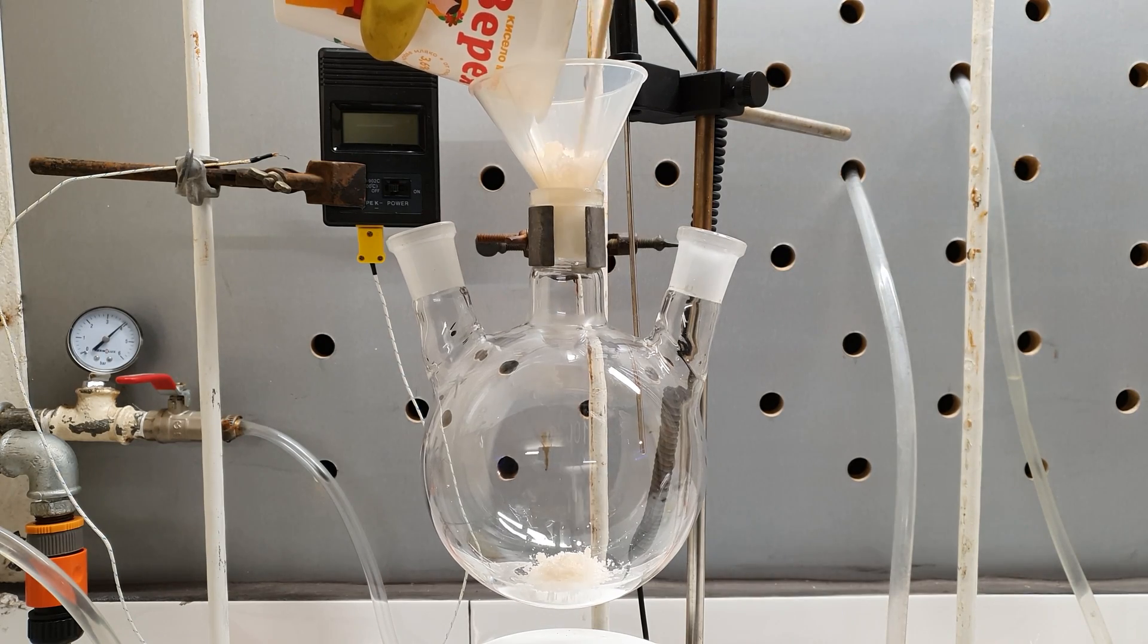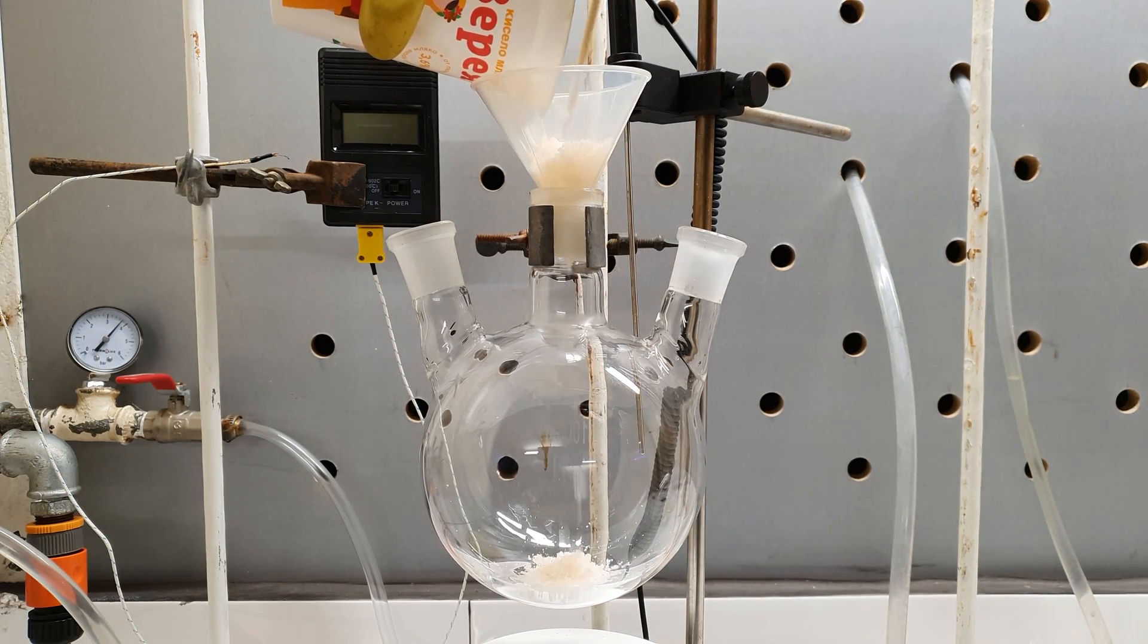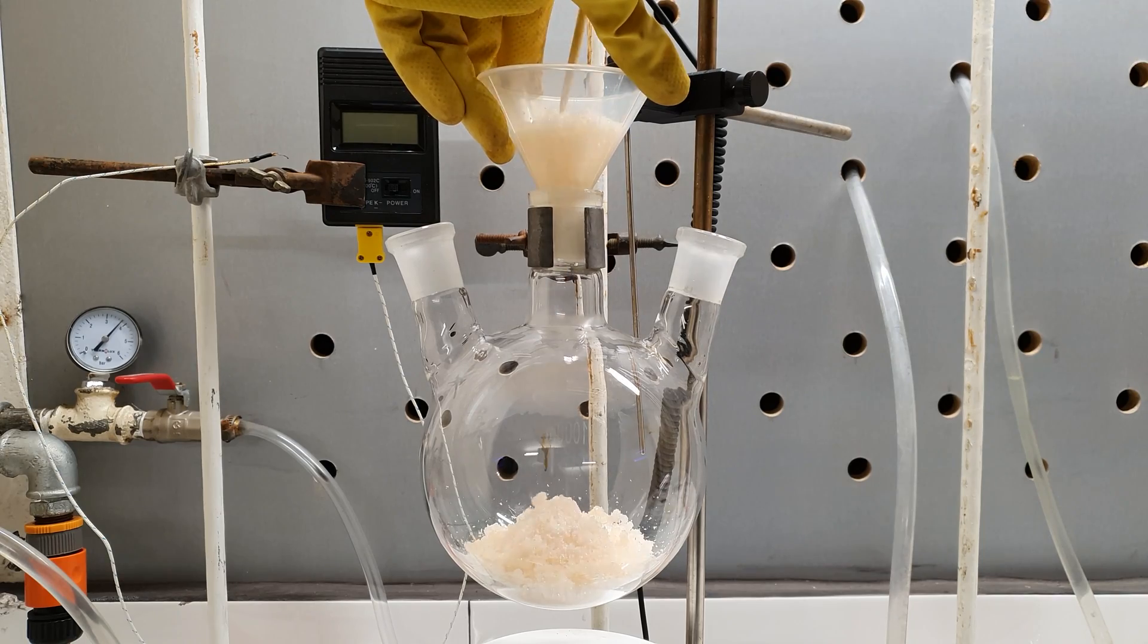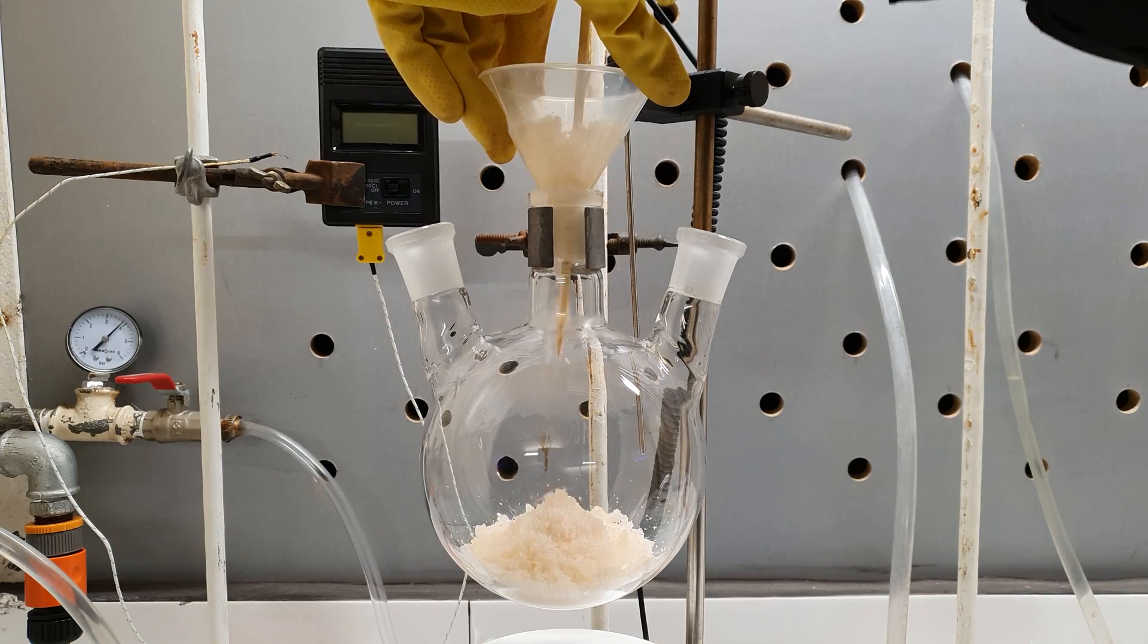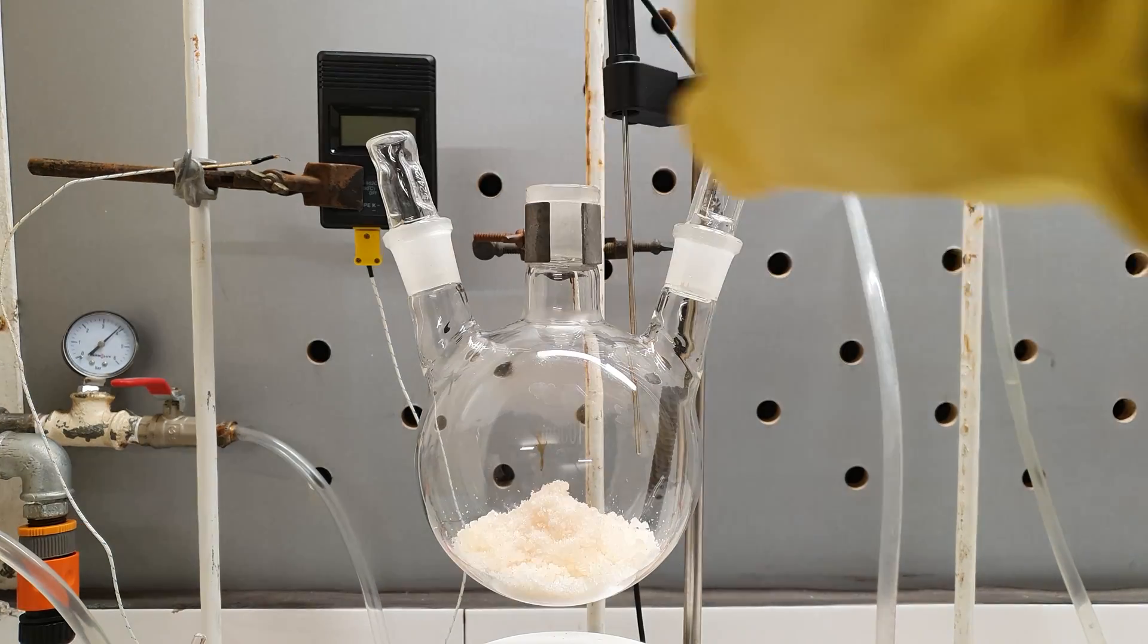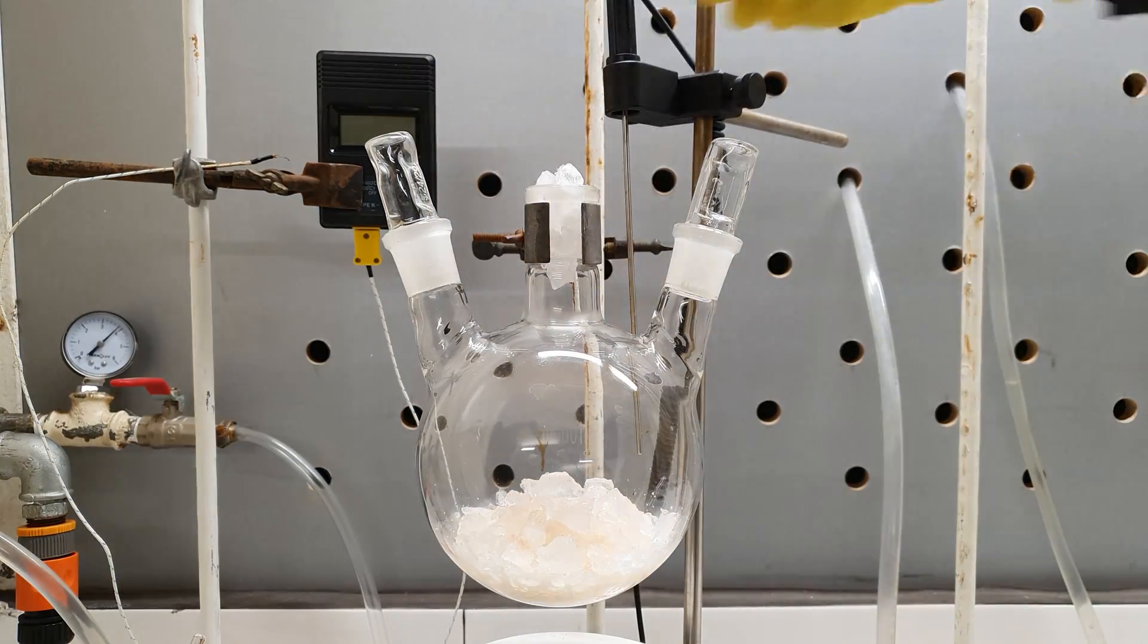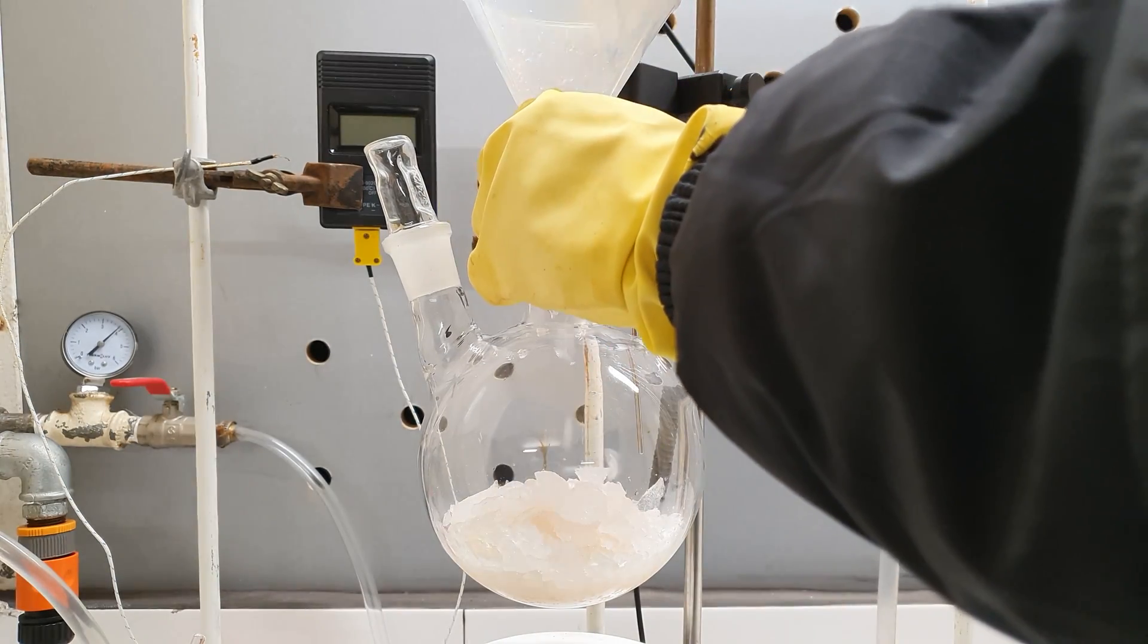I placed 100 grams of chloroacetic acid in a 1 liter, 3-necked, round bottom flask. To this, I added about 150 grams of crushed ice.